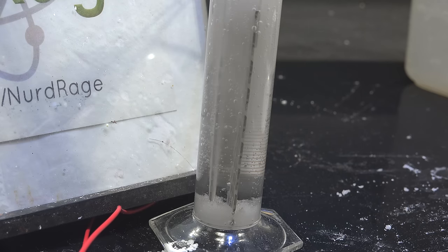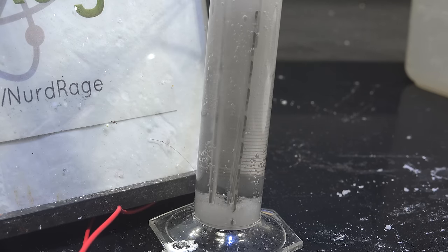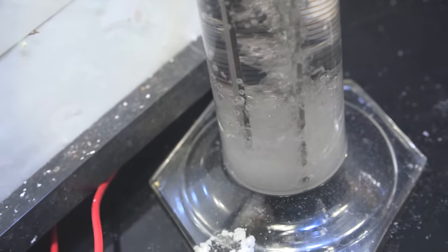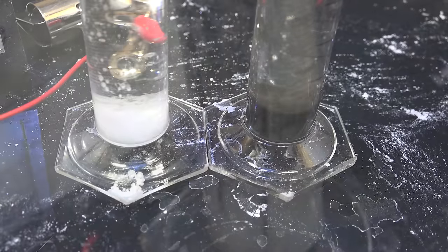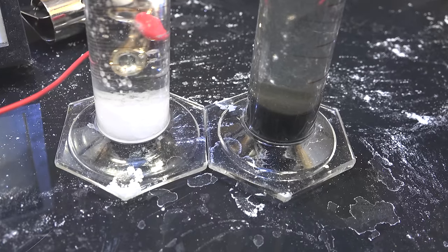The corrosion rate is so low that you don't have to worry about contaminating your potassium chlorate to a significant degree. And here we are after several hours, pure crystals of potassium chlorate have settled on the bottom. After some filtering this can be used directly for chemistry or pyrotechnics. And here are the two electrode results side by side. As you can see there is no contest in terms of quality.